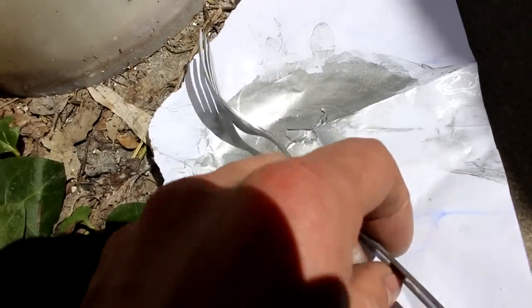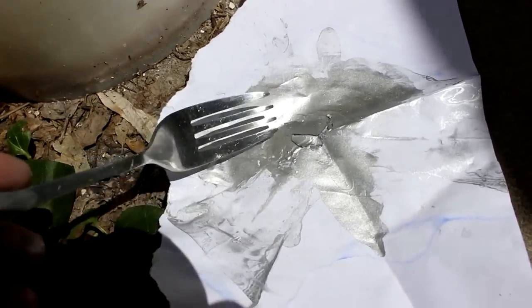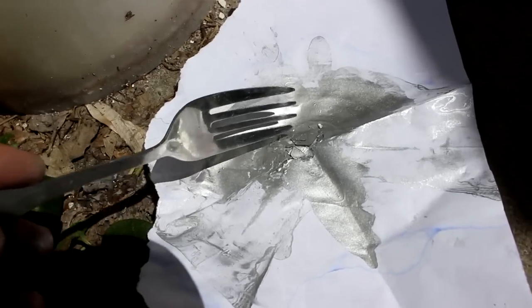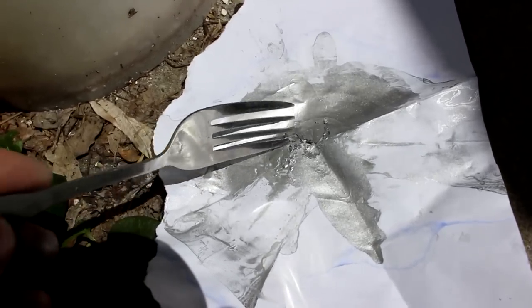How about I filter it? That way I'll be able to capture the aluminum particles while the acetone, which potentially has stuff dissolved into it, runs through the filter. At least the particle size on the aluminum is not small enough to go through this filter. All the acetone dripped out. I've rinsed it a couple of times and let it dry in the sun, and I've got some nice pieces of aluminum powder cake.